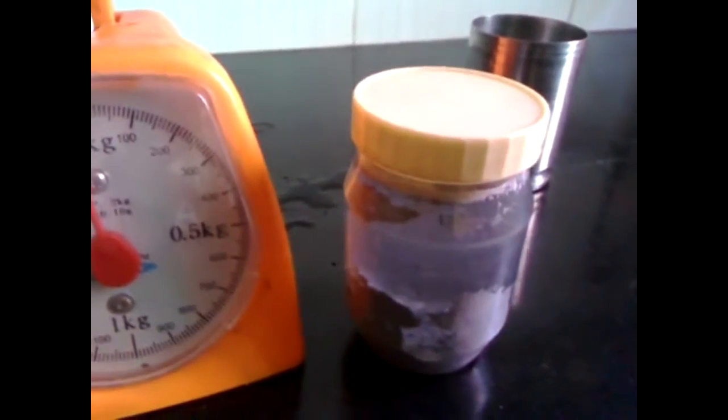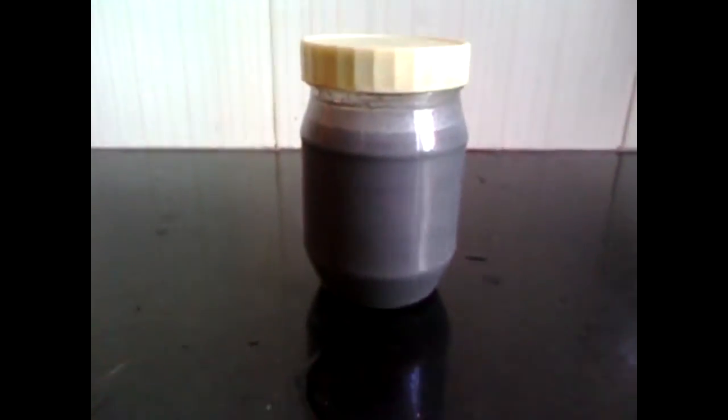Just shake it — it will work. After mixing the solution you will get a dense colloidal liquid. I'm going to filter it using my homemade filter — it's a PET bottle with its neck upside down with a circular newspaper cut out.